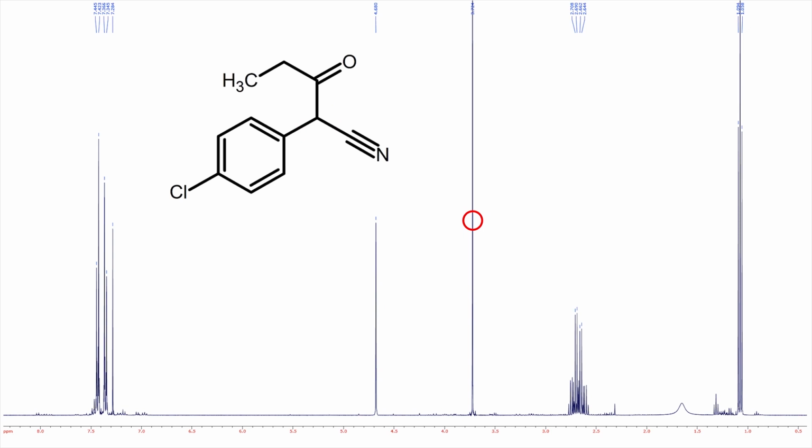This spike over here is leftover dioxane. It wasn't entirely washed out with water, but it's not going to affect our future chemistry, so it's not worth putting additional effort into removing it.